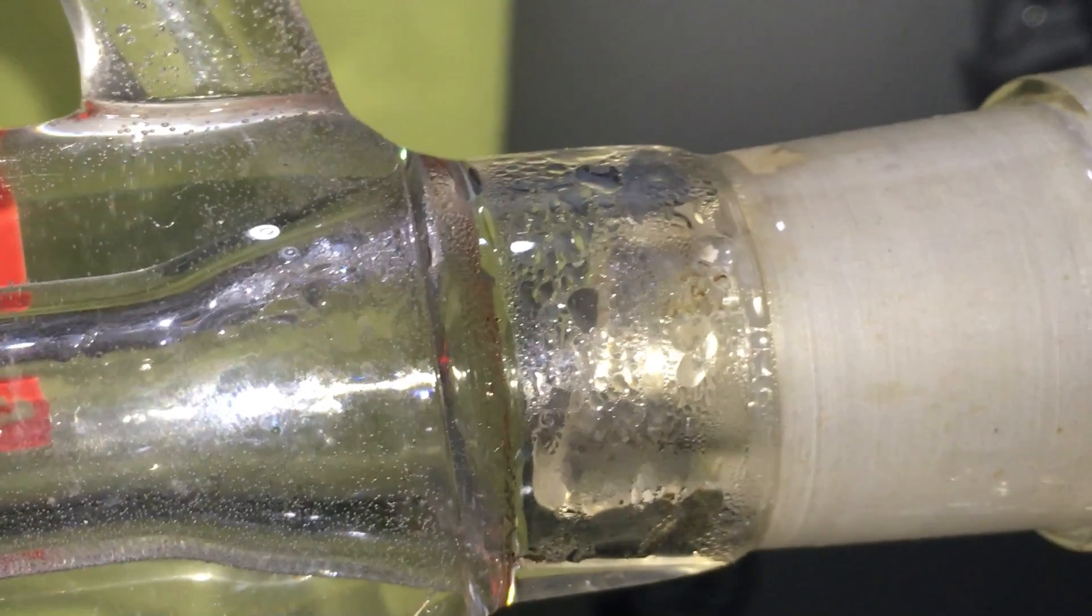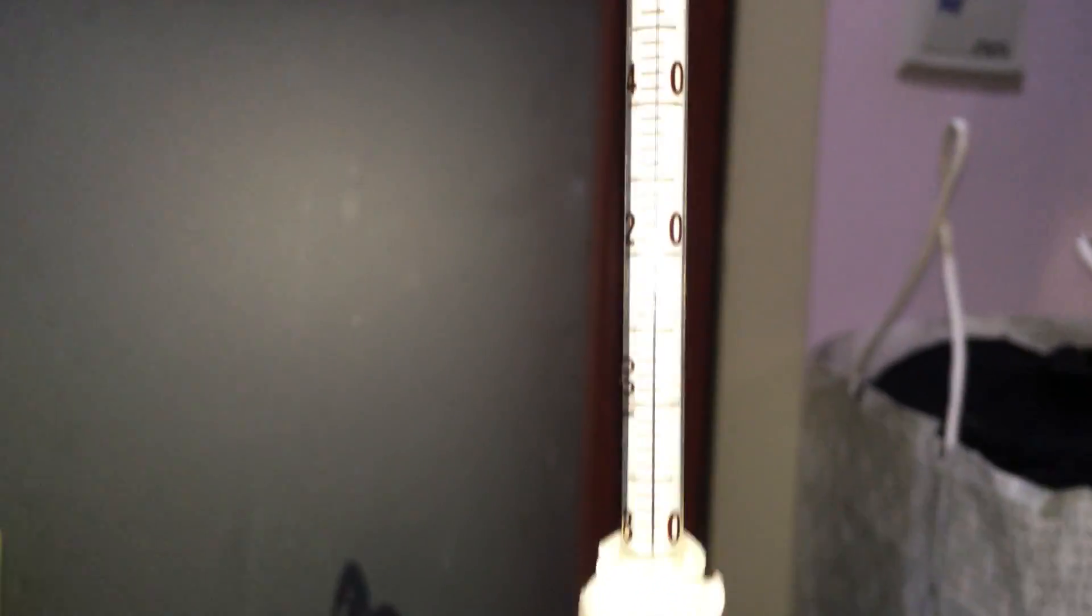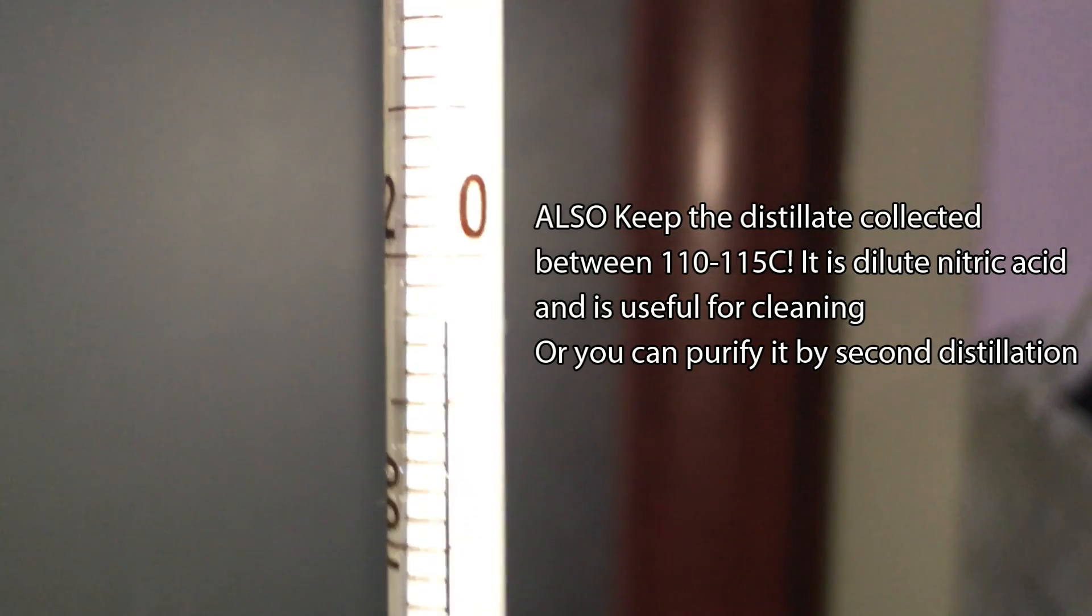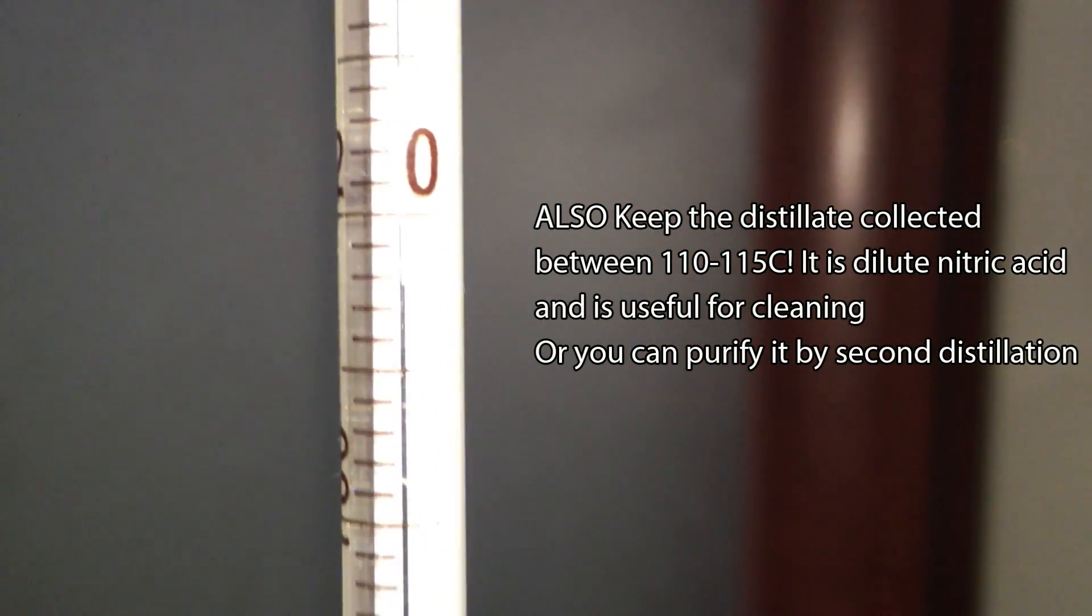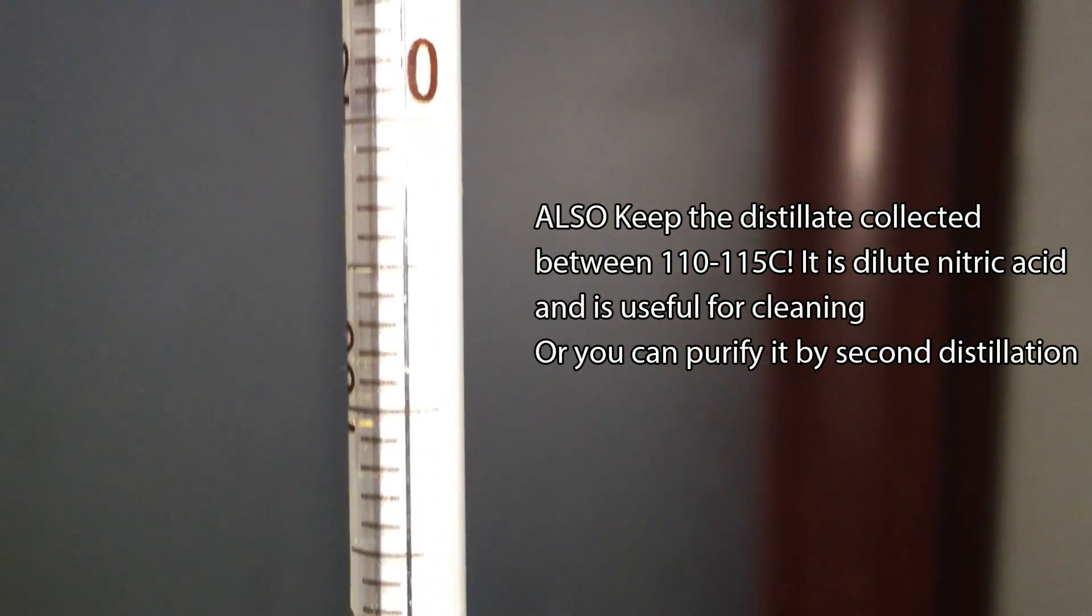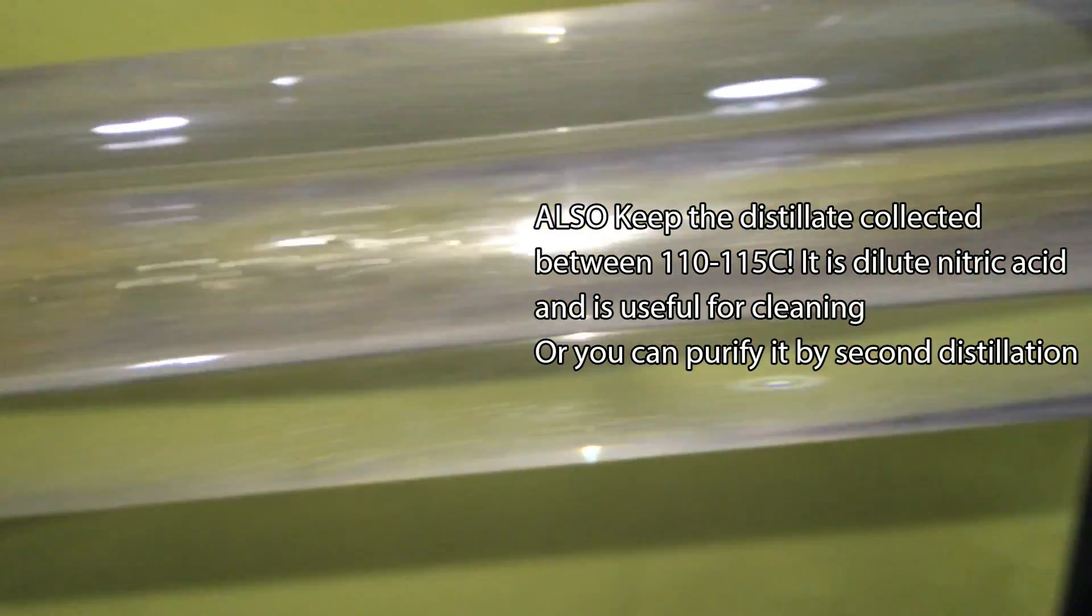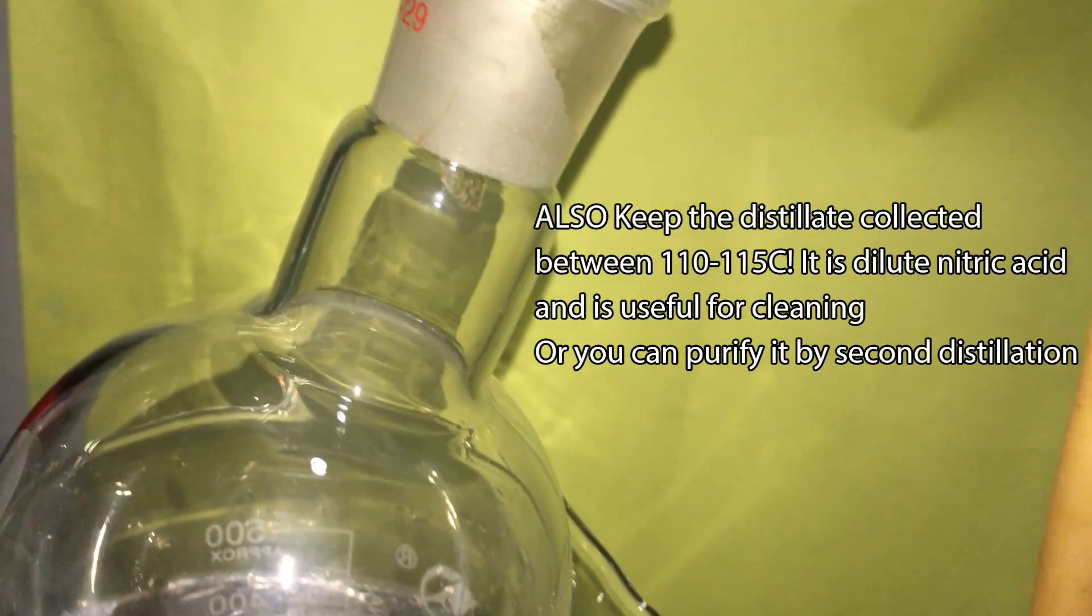So the vapor enters the condenser. Let's check out our receiving flask. As you can see, nothing is coming off. Our first milliliter of distillate has come out. Now the temperature reaches around 115C. Get prepared to switch a new flask for collecting the concentrated nitric acid once the temperature gets to 117C.